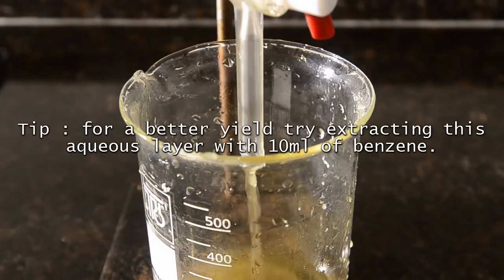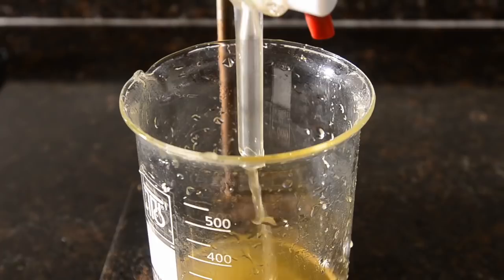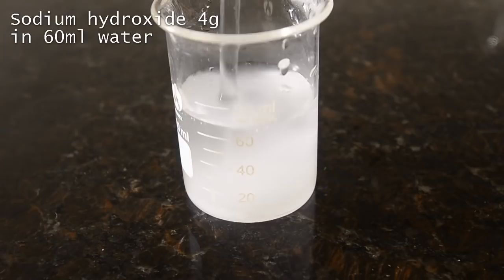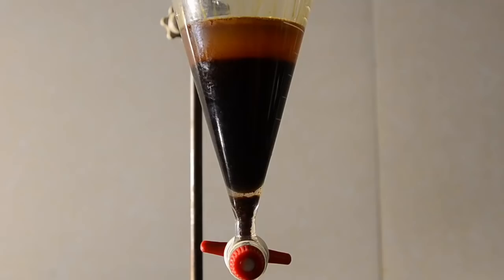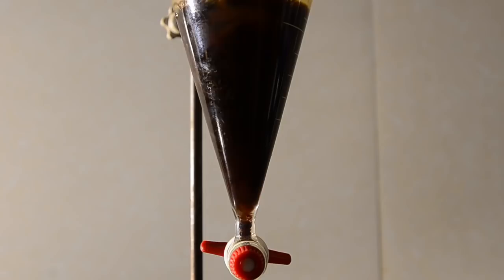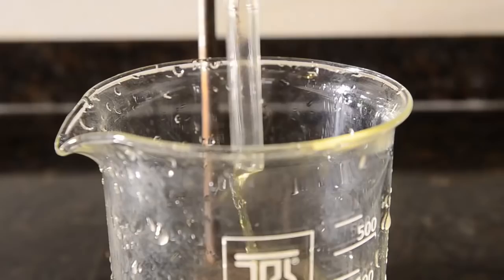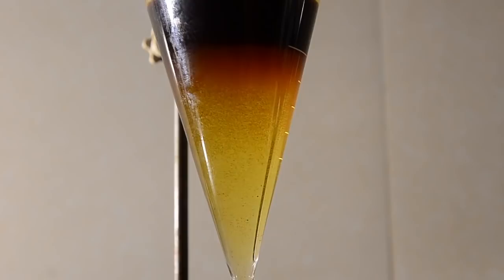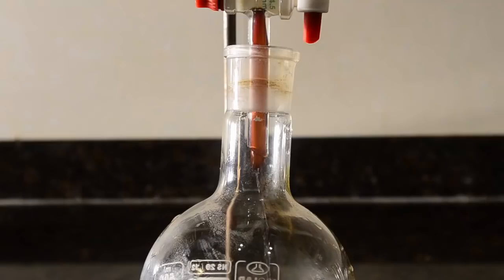Now make up a solution of 4 grams of sodium hydroxide in about 60 ml of water. Add this to the funnel and give the mixture a shake in order to remove any toxic residual bromoacetone. Let the layers separate and then remove the bottom aqueous sodium hydroxide layer. The organic layer should now be free of lachrymatory effects.